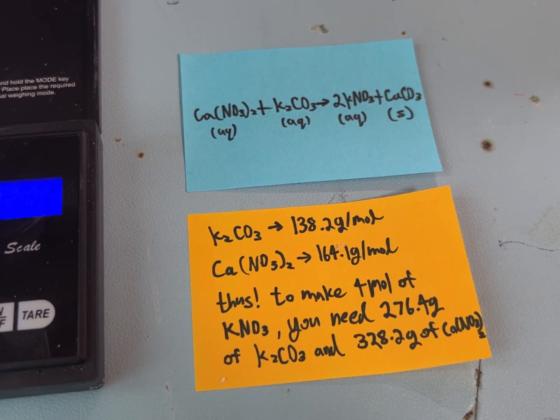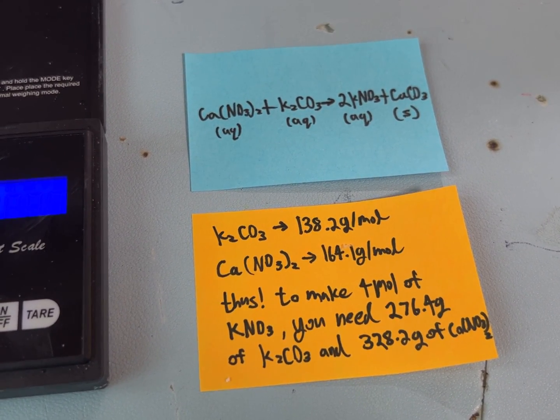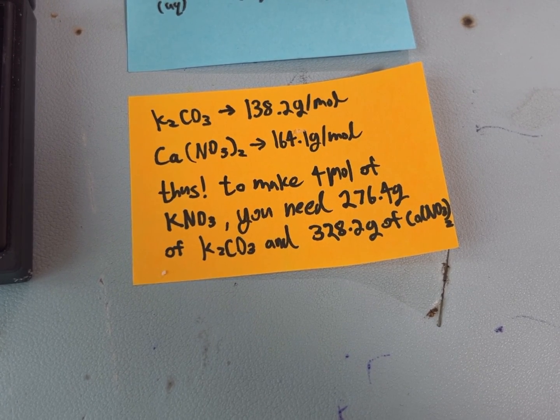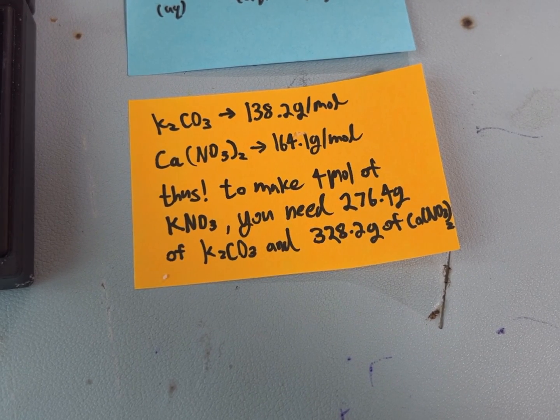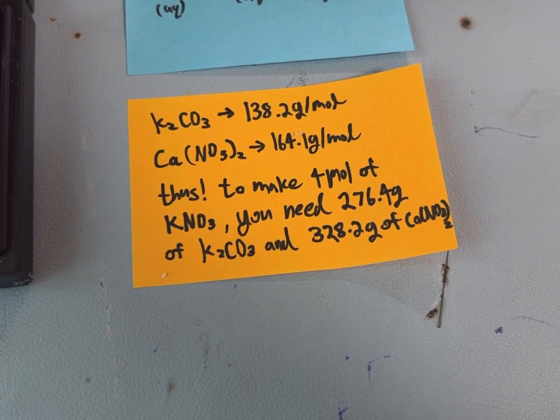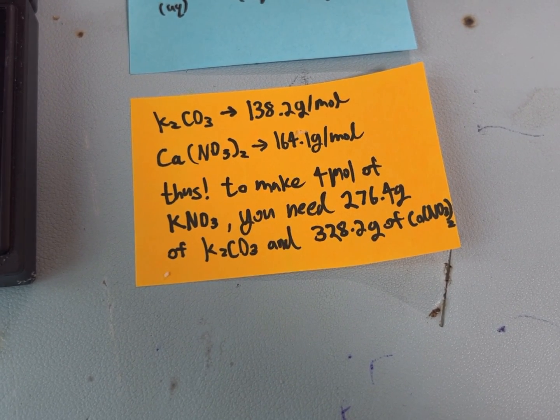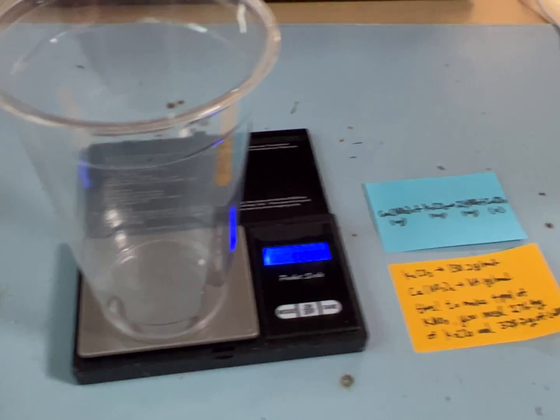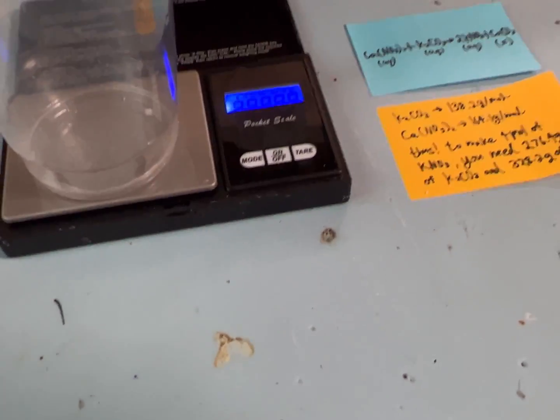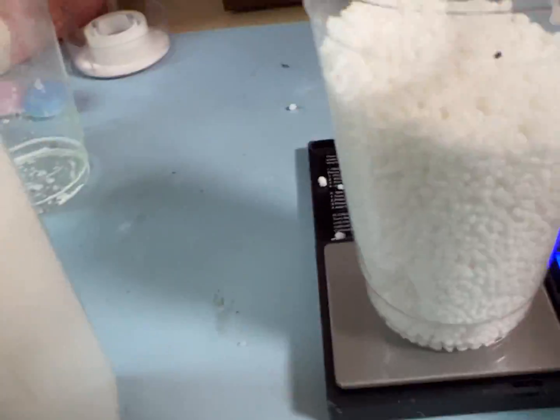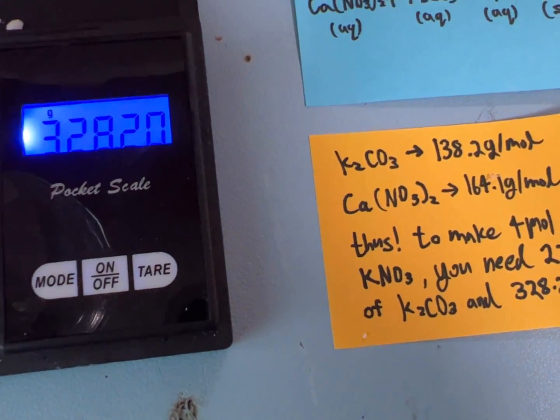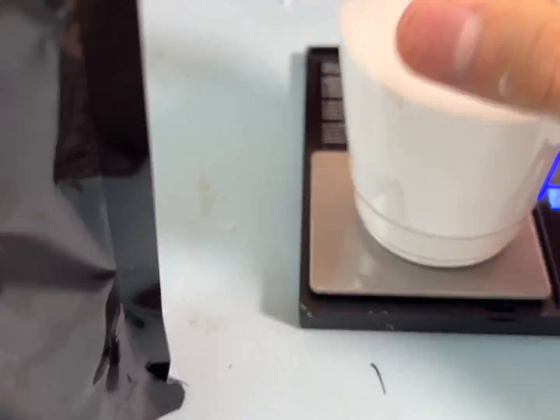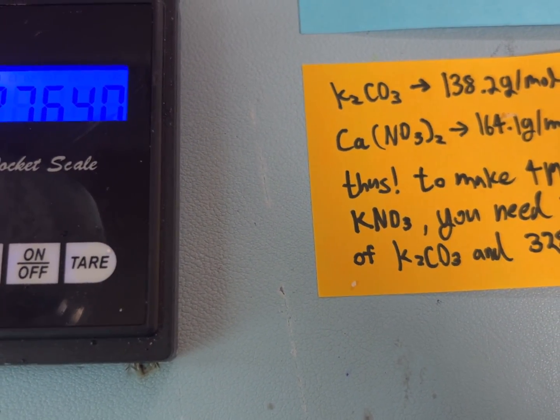If you look at the equation on the blue paper, you can see that one mole of calcium nitrate and one mole of potassium carbonate synthesizes into two moles of potassium nitrate. On the orange paper, one mole of potassium carbonate is 138.2 grams and one mole of calcium nitrate is 164.1 grams. So to make four moles of potassium nitrate, I'll need 276.4 grams of potassium carbonate and 328.2 grams of calcium nitrate. Let's weigh out 328.2 grams of calcium nitrate, and then 276.4 grams of potassium carbonate.